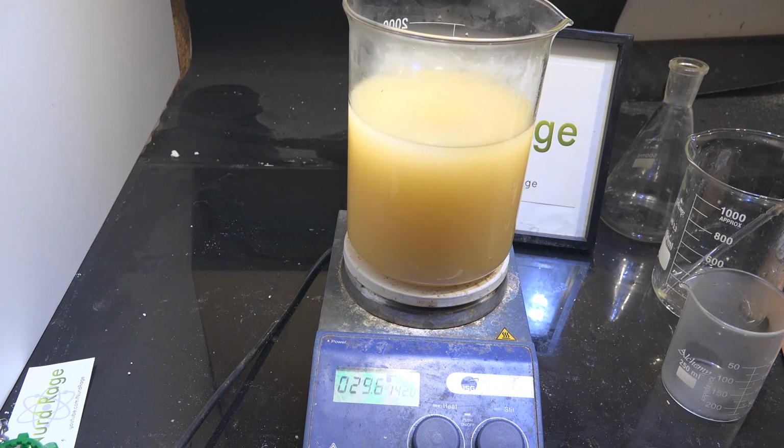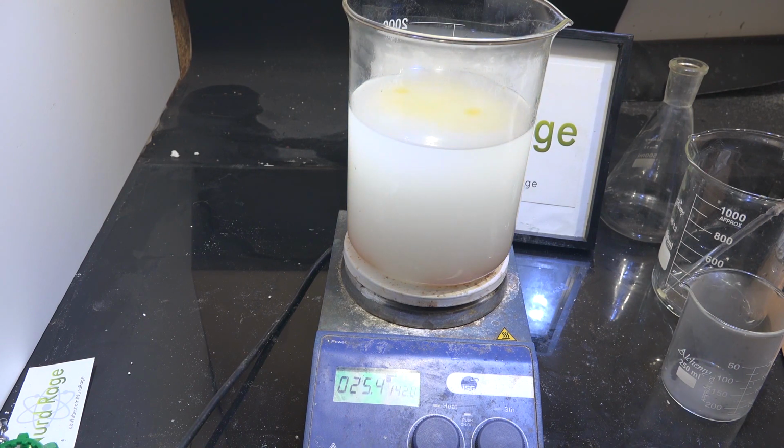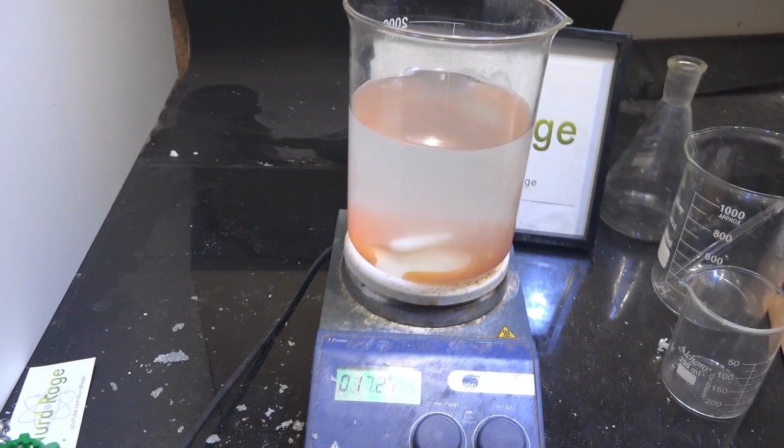What we're doing is neutralizing the sodium methoxide to sodium chloride and methanol. The sodium chloride and methanol are very soluble in water and stay in solution while the organic products will precipitate out. Most of this is done in a few hours, but I'm going to let it go overnight. And here we are the next day.